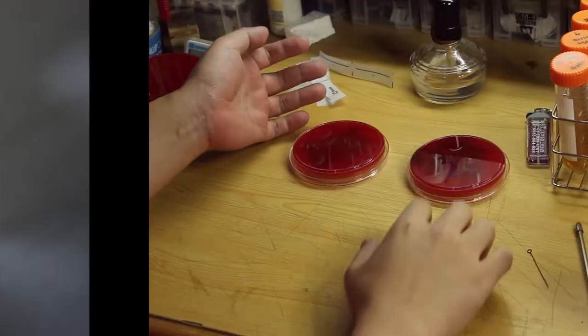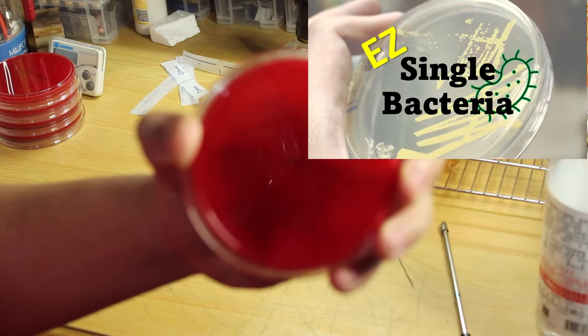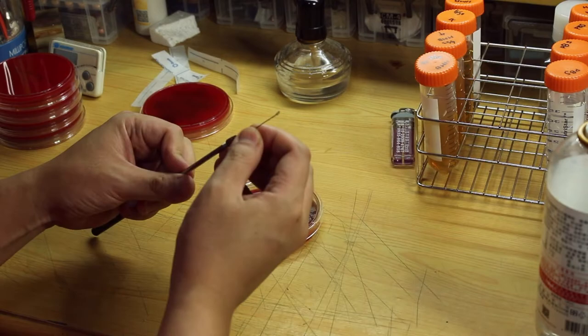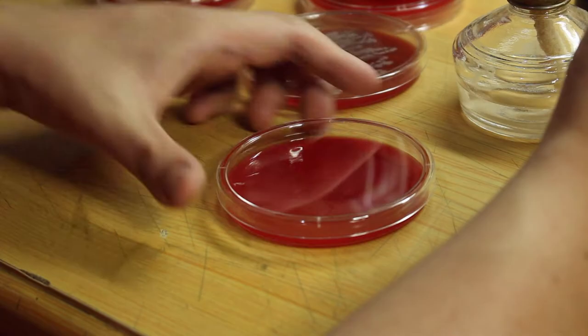So that's the spot we want to look for. Next we have to isolate pure bacteria. The method I'll be using is called streak plate method, which I have had one video before. If you don't know how to do it, I'll focus on the center of those transparent spots, picking up small yellow-ish round colonies, transferring them onto new plates and incubating them in the same warm place. Repeat this process until you acquire a single pure colony like this. This might take several times.